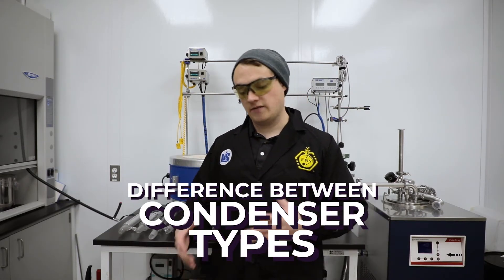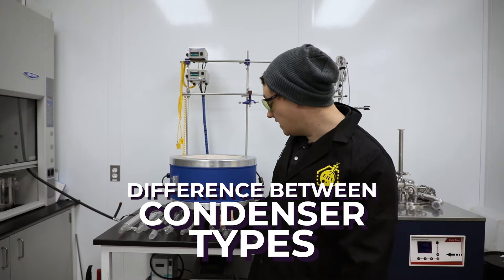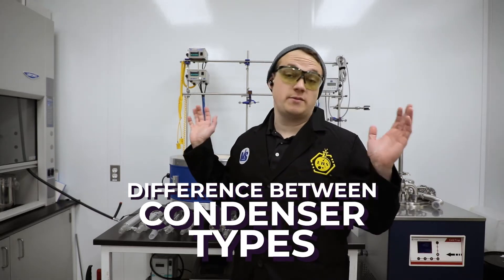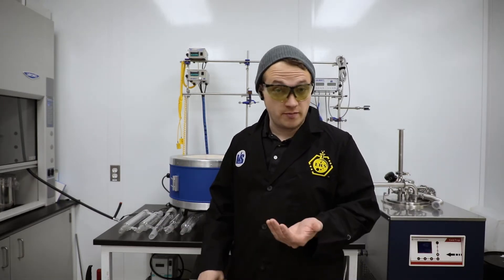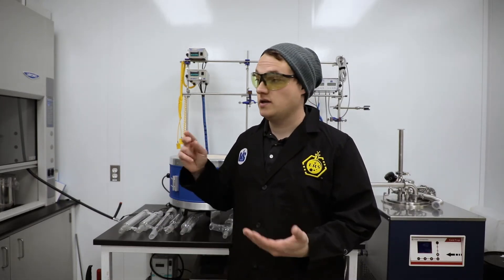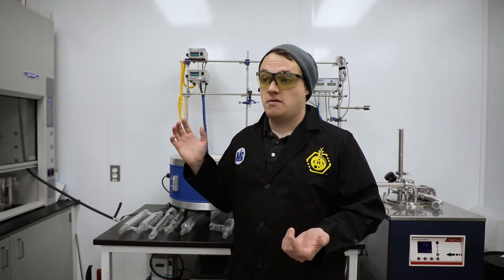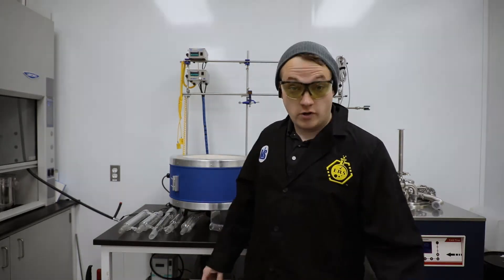Happy Wednesday. This is Mike here with Lab Society and I'm going to talk about the differences between various condenser types for various types of distillation, whether it be benchtop short path distillation, terpene distillation, really any type of distillation that you'd want.